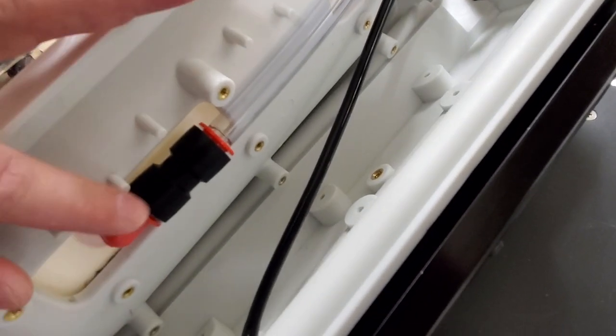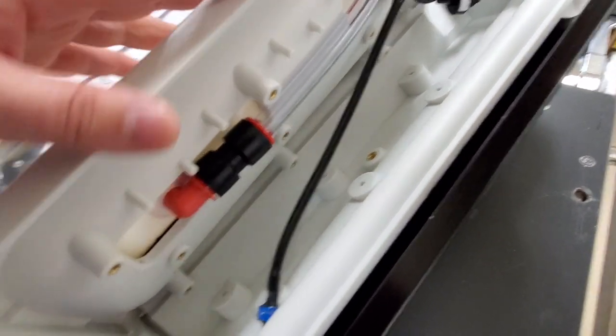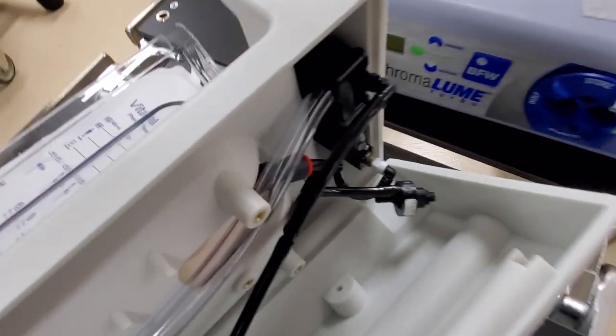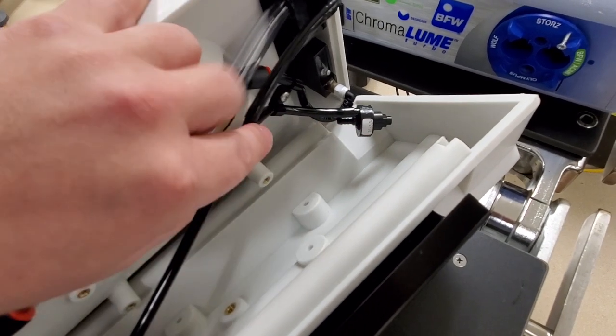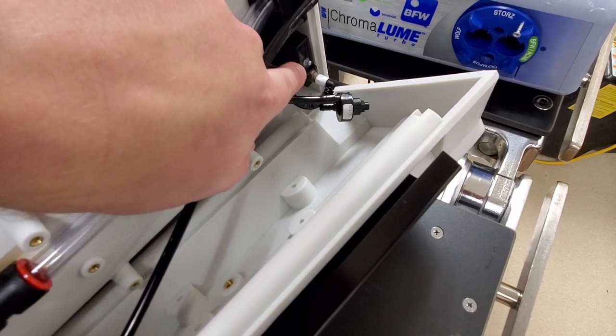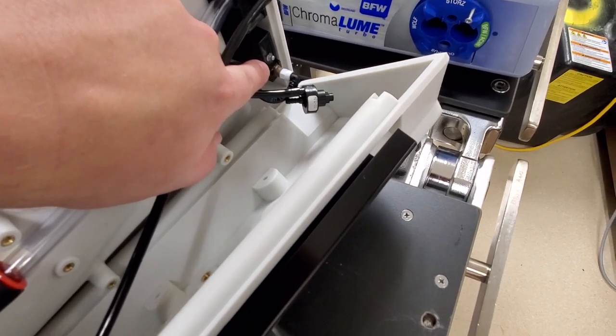This particular unit, as soon as we opened it up, this guy right here fell out. This just presses in, but it fell out. And that is where the leak was, conveniently enough. I have had other times where I've had to adjust that valve right there. And I've had other times where I've had to adjust the scale, see that screw right there? That will adjust the needle and the offset of the analog gauge.